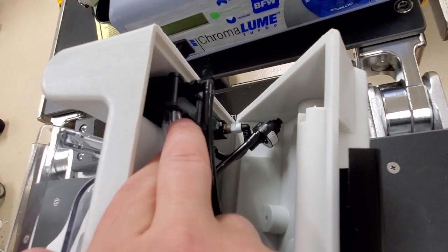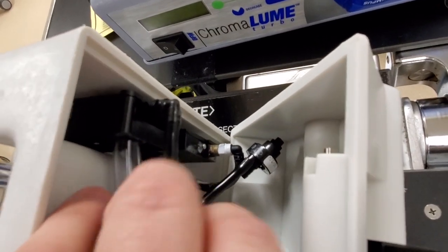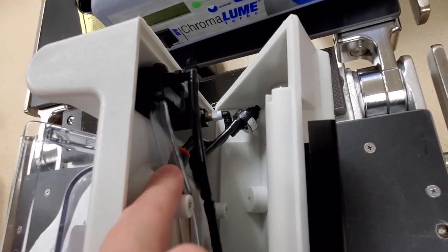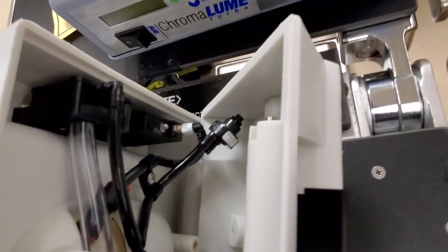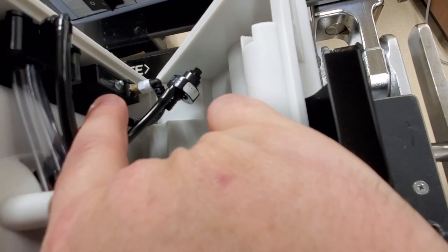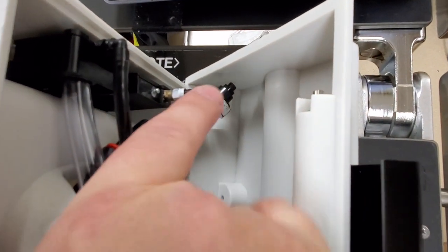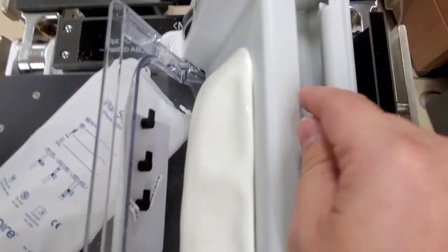This is a slider valve, see right there on the plus and minus. This will actually just slide back and forth over a couple different O-rings and it will either vent the atmosphere or it will go in this clear line down to your bladder. And you can see over here, I've got a couple other things going on. One of them right there, that is your millimeters of mercury analog gauge right there on the front. And this guy right here is your overpressure or your pressure adjustment for your bladder.